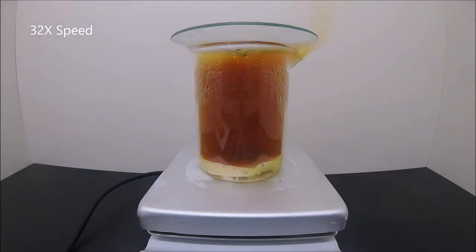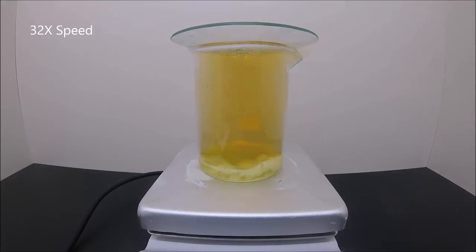Unlike most acid-metal reactions, hydrogen is not generated. Because NO3− is a stronger oxidizer than hydrogen ion, which explains why metals with lower reactivity than hydrogen can be dissolved in nitric acid.